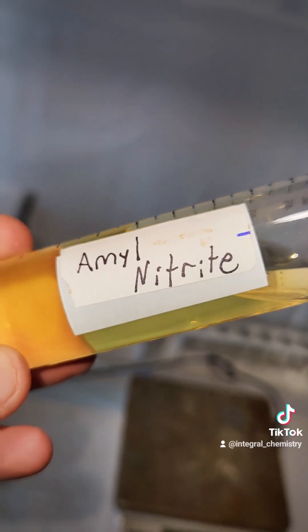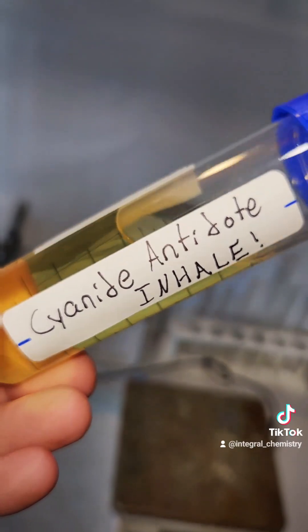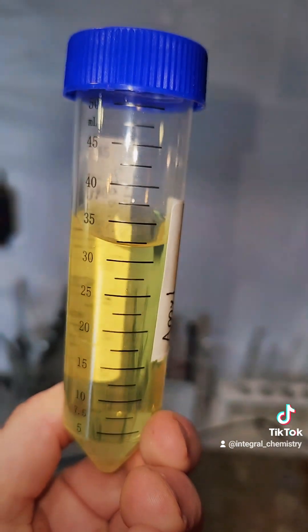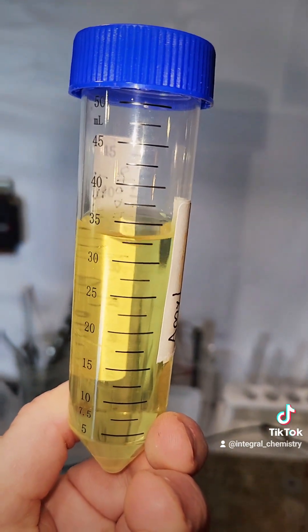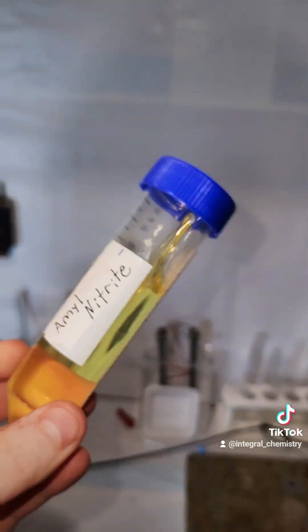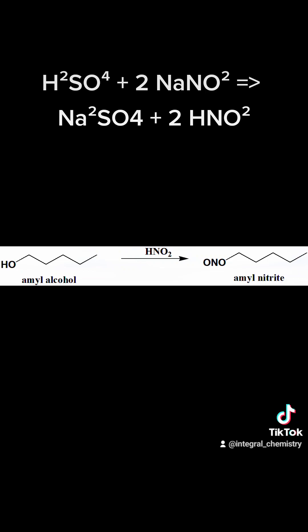Anyway, apologies for my rant. In the end, I got a 77% yield out of this process, which is actually better than I expected. If you enjoyed this and you would like to see more videos like this, consider following and subscribing for more.